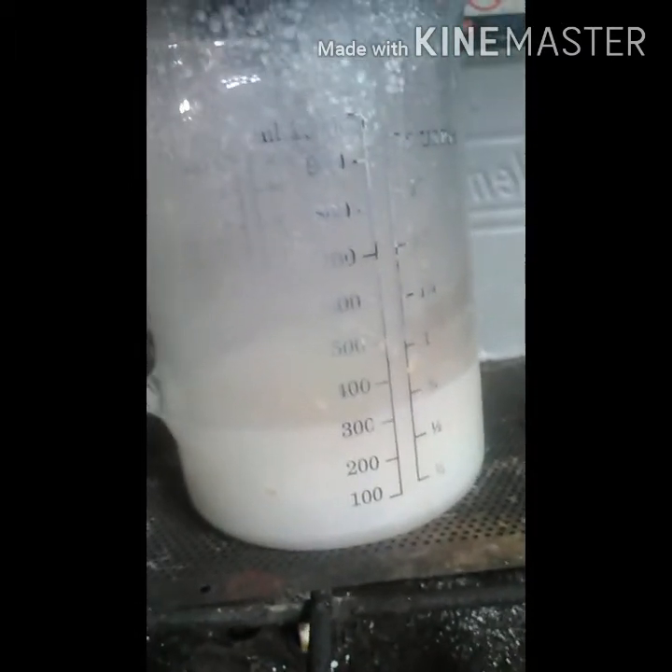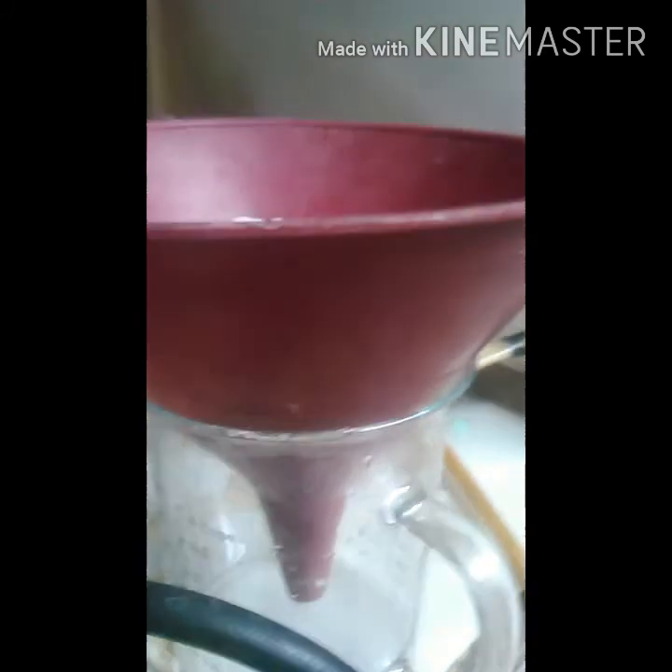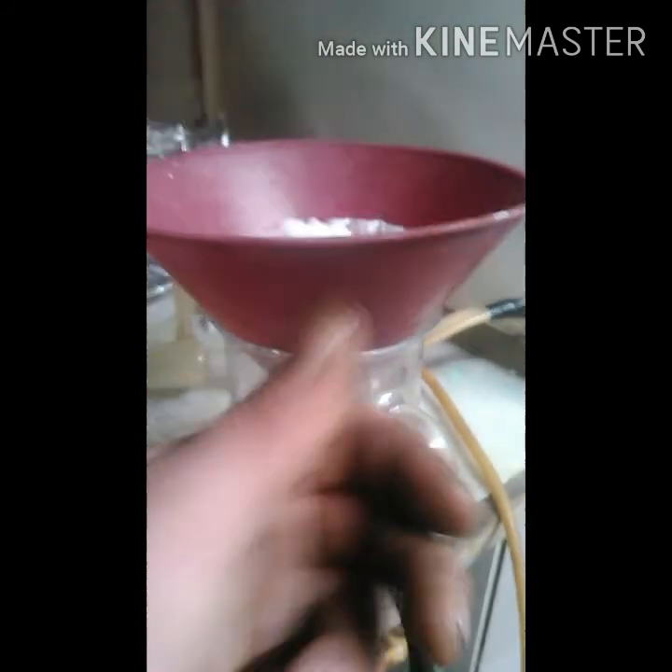Now I'm going to filter it, dry it, and that's that. I got it all on the filter and I'm going to let it drip — I might put my vacuum filter on to help suck it dry. I've got purified ammonium nitrate here, probably in the high 90s purity. The calcium that's in there can be so powdery fine that it'll just go through, so you probably can never get to 100%, but I'd say I'm at 98-99%, which is good enough for me.